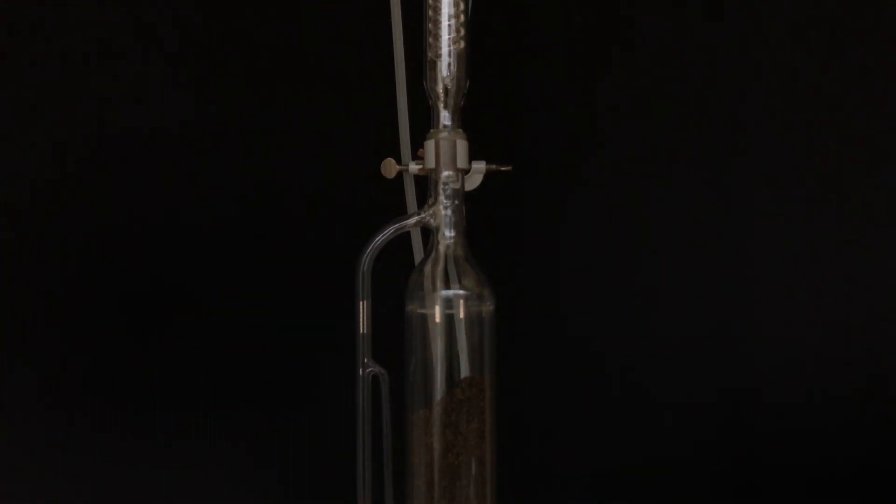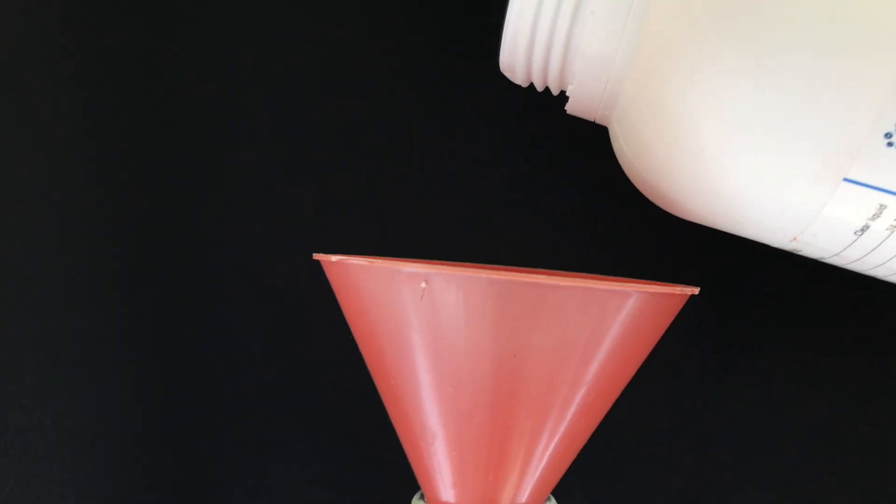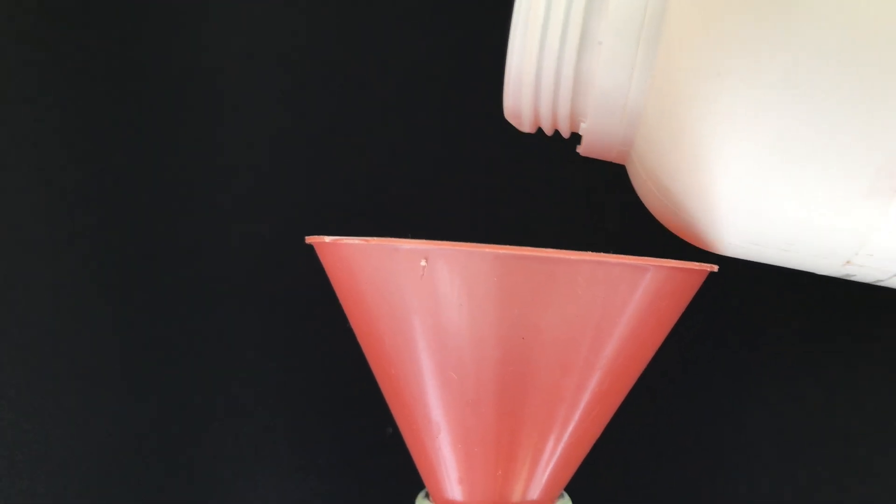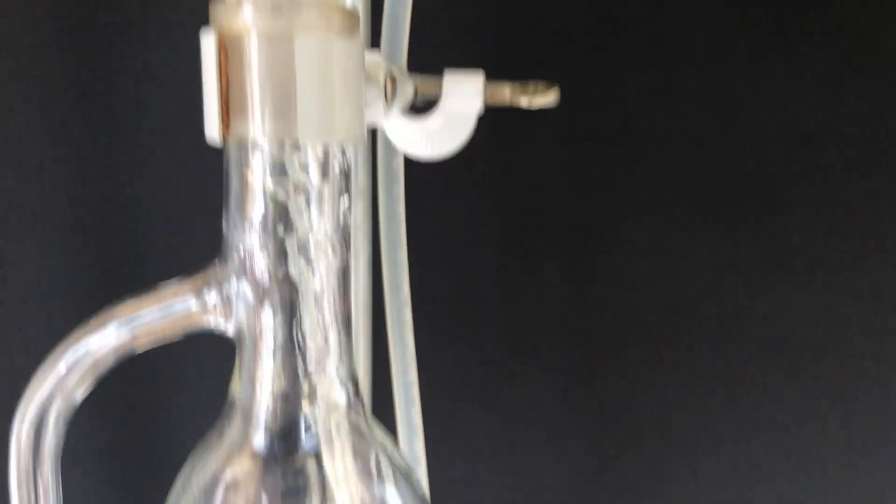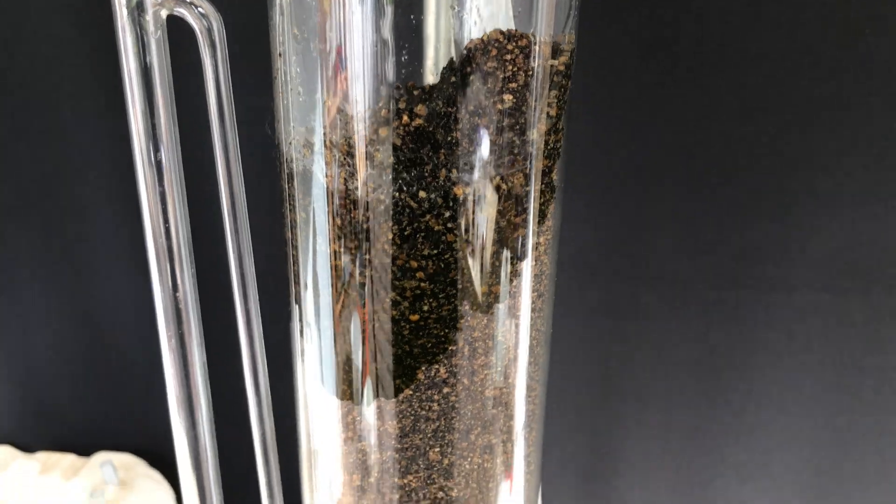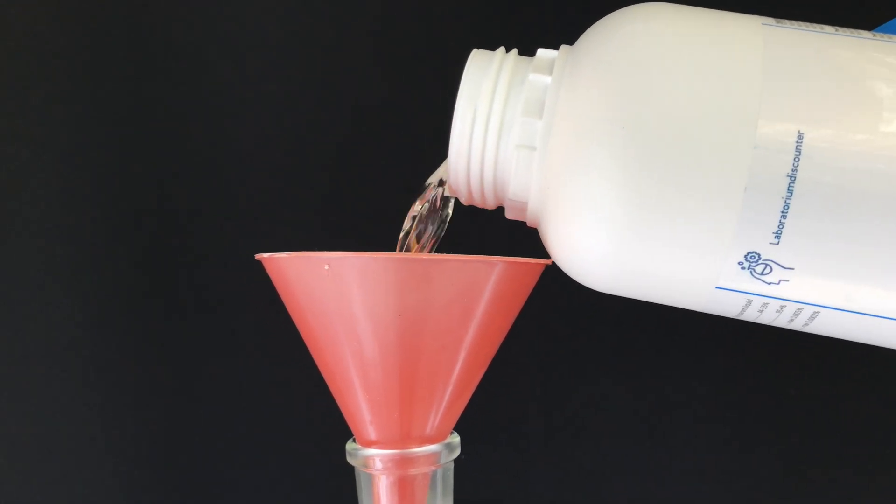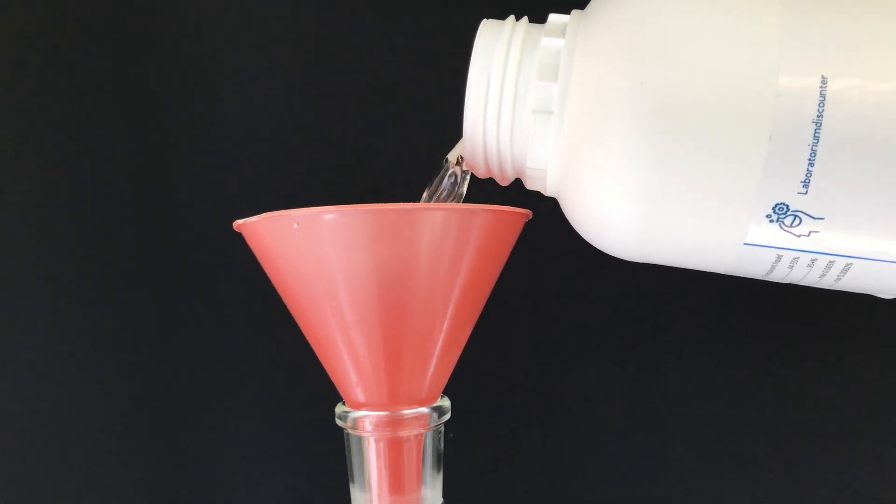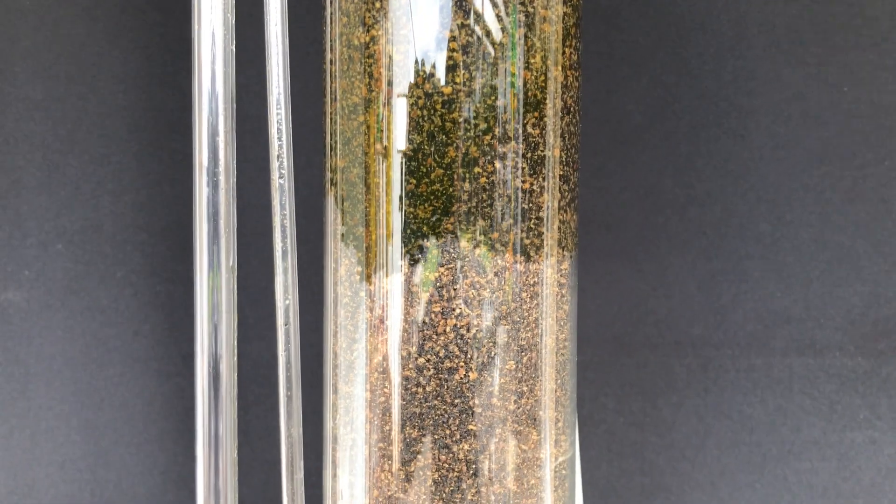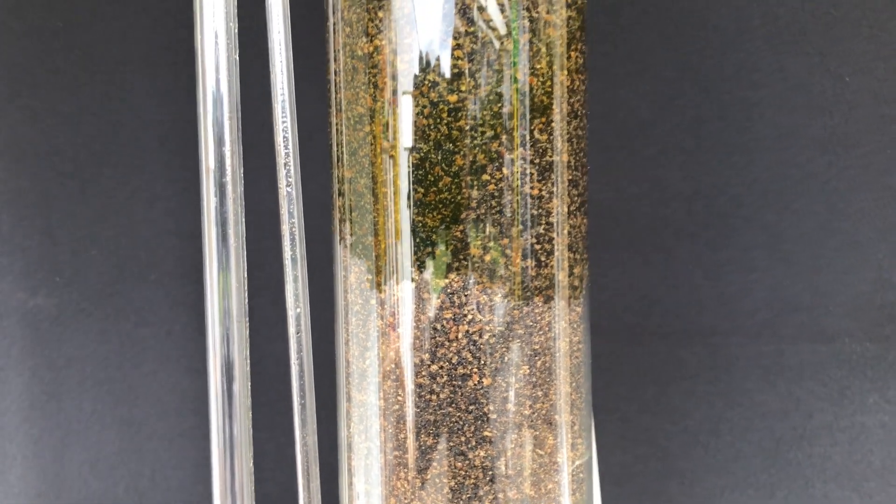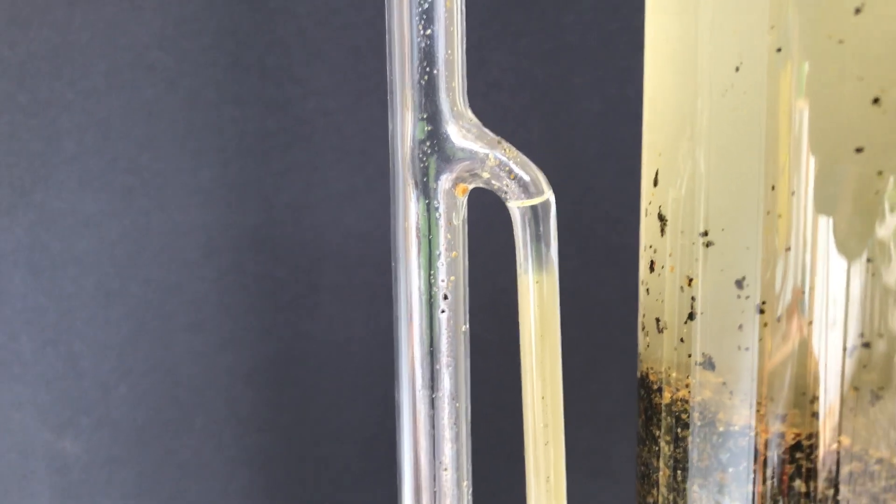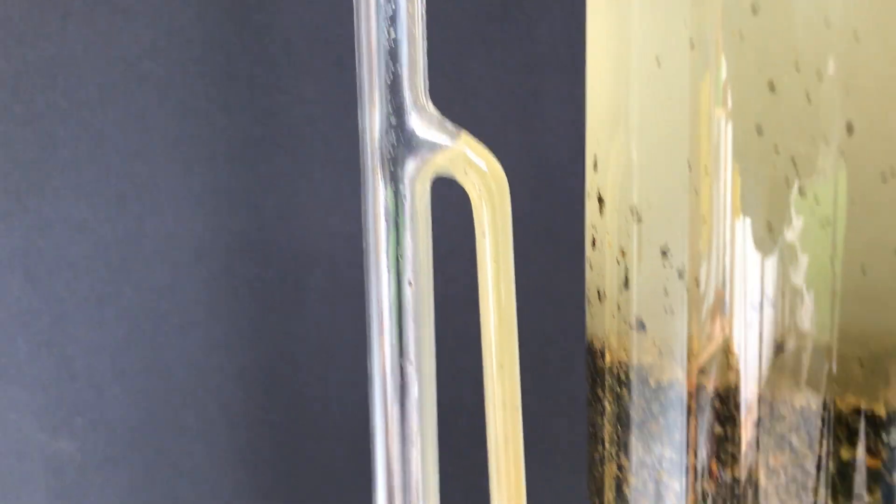As tropane alkaloids might be present in the form of a salt, you need to add ammonia to freebase them. Ammonia is not too caustic and will not hydrolyze the tropane alkaloids which are actually simple esters of tropic acid. If sodium hydroxide were used instead, the esters may be hydrolyzed to form tropanol, scopine, and tropic acid, which we also made synthetically in a previous video.